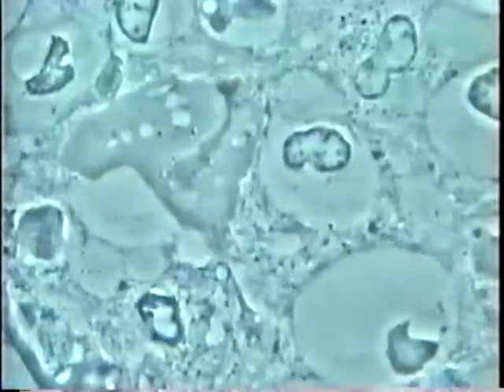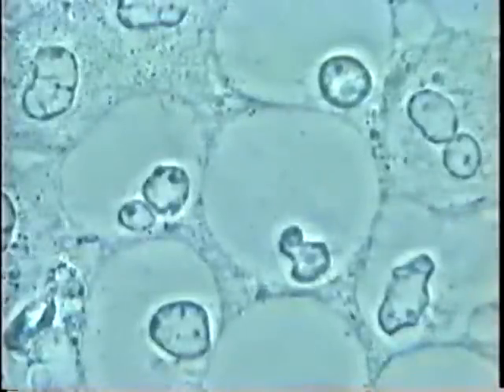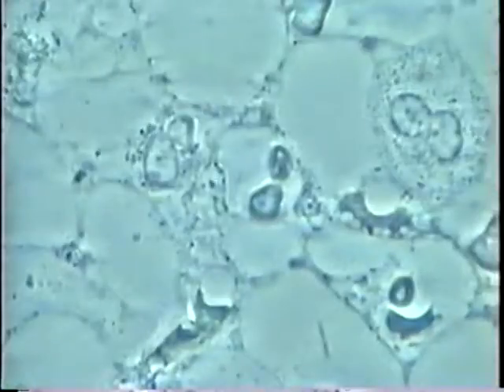Now we see many white cells with nuclei, which normally should be defending you against the disease. So get rid of those parasites if you want to get better.